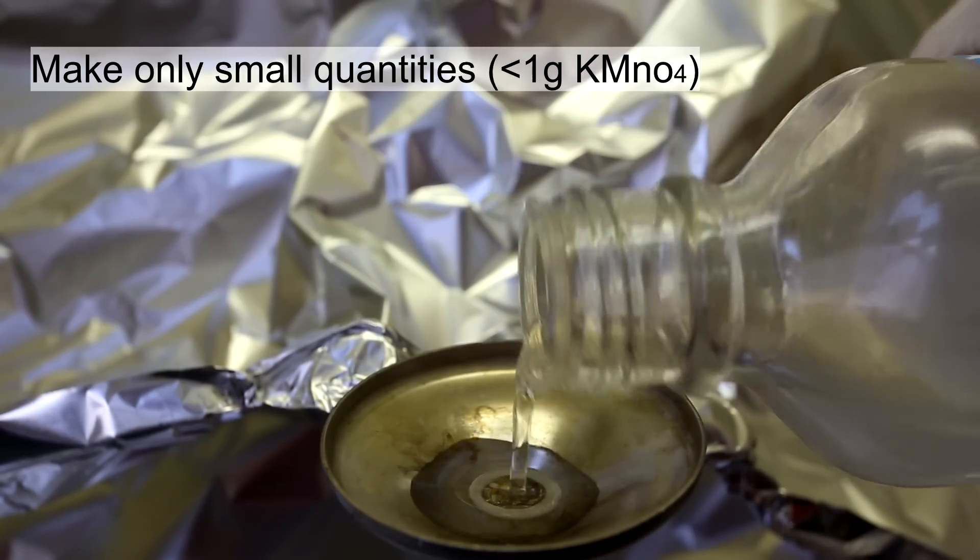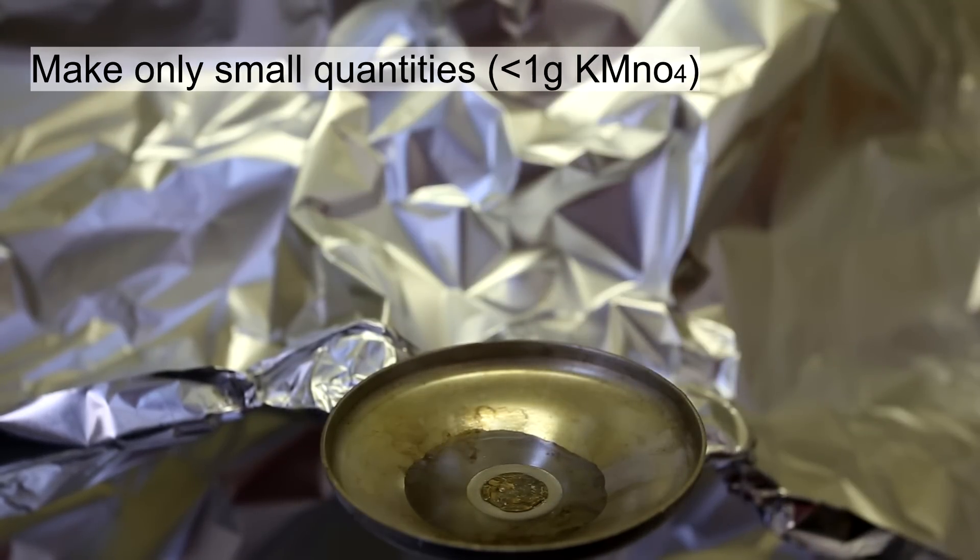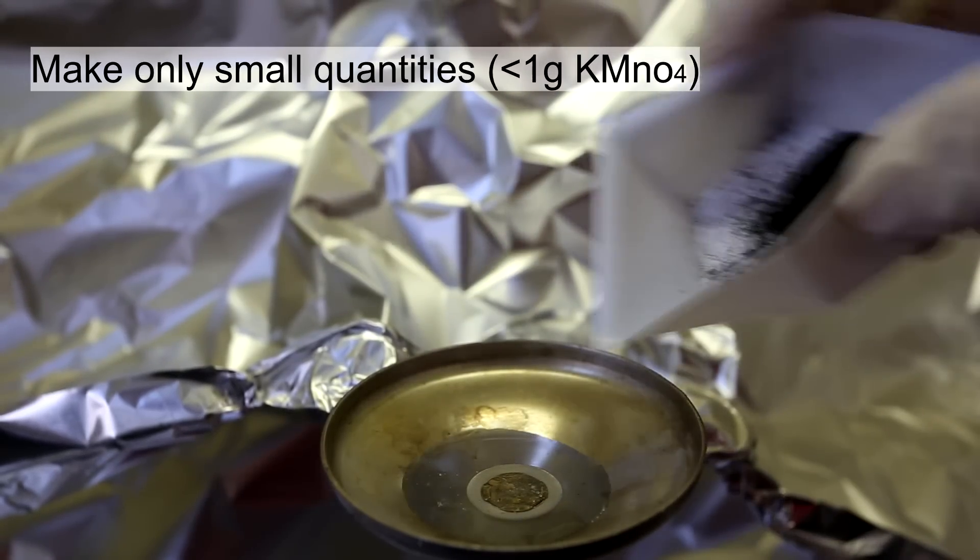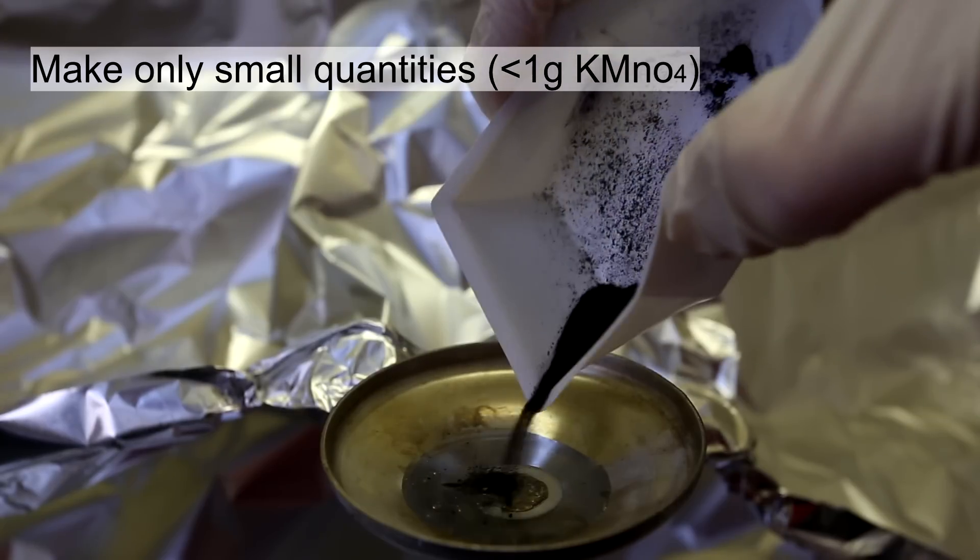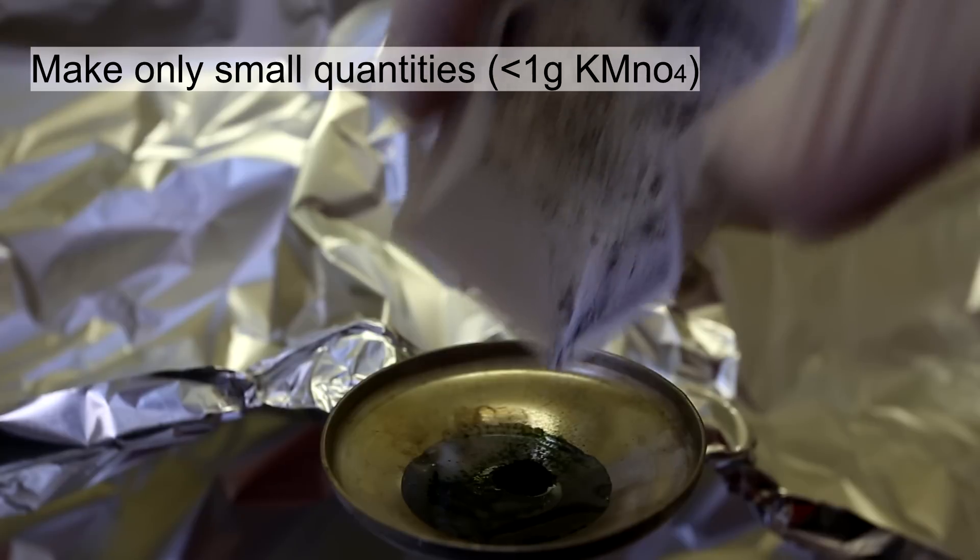Manganese heptoxide can be easily synthesized by adding potassium permanganate to an excess of concentrated sulfuric acid. First, add the sulfuric acid and then drop in some potassium permanganate.